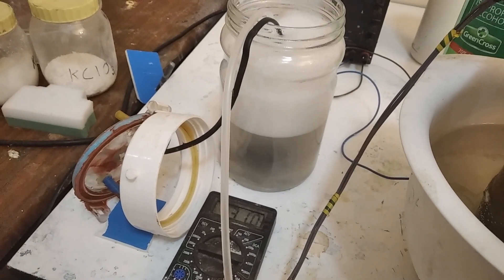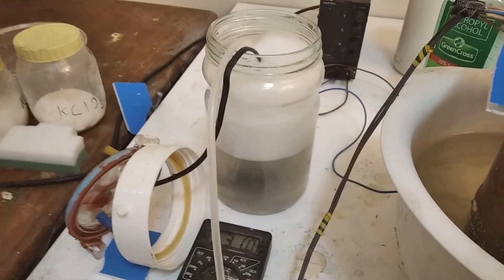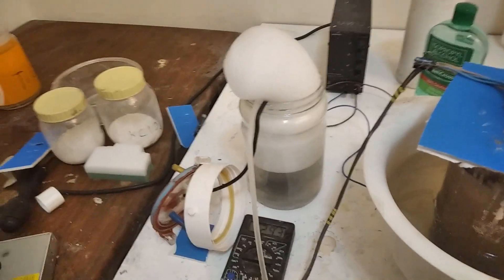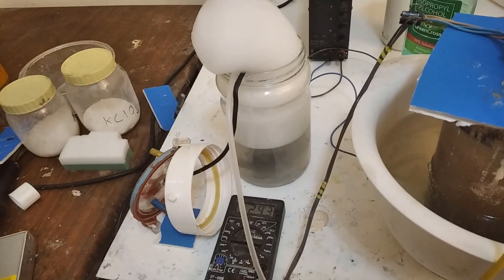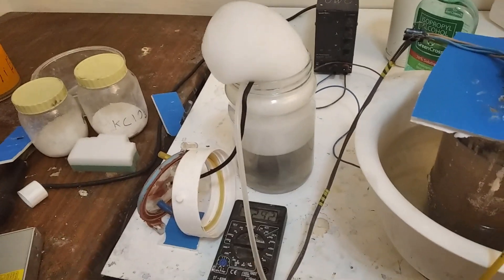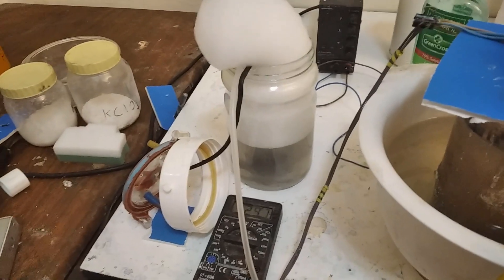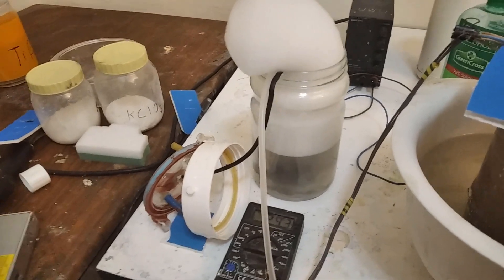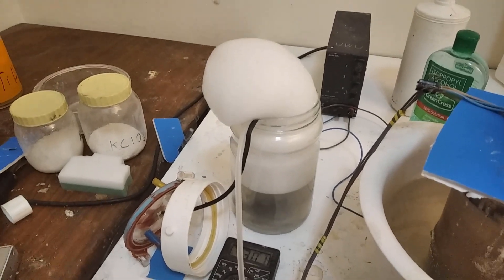That's actually another viable thing - you can just open up a battery, toss it in, add some soap and water, and you've got yourself an ozone scrubber that's even catalytic, which is better than this. I have to keep scooping out this foam until you reach the critical micellar concentration of the surfactant. Also, do not light this foam on fire. Although it didn't really explode because it's highly diluted with air, if your cell ran more amps, you should add a very small amount of surfactant until there's just a few centimeters of foam, because this is a hazard in and of itself.